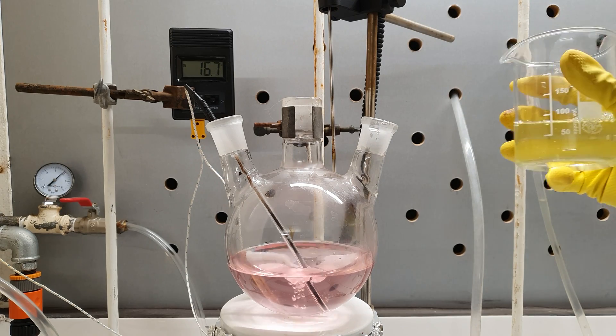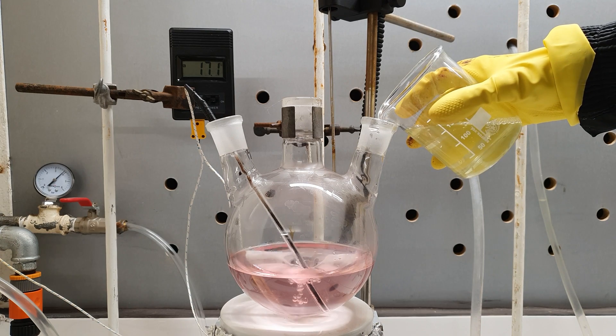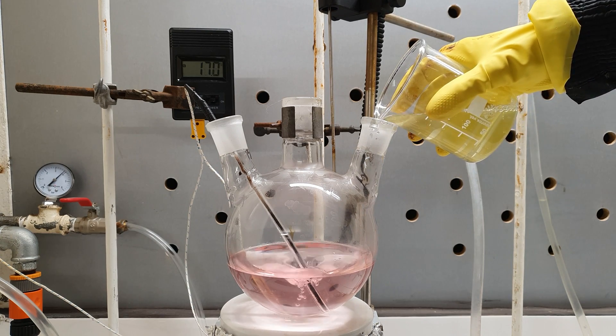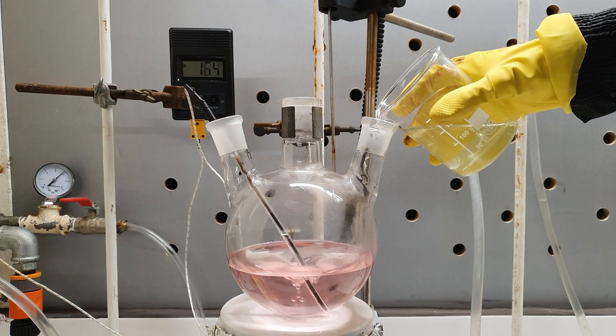Now it's time to add the other reagent, which is sodium nitrite. Unlike the hydroxide, I can add it all at once because its addition isn't exothermic at all.